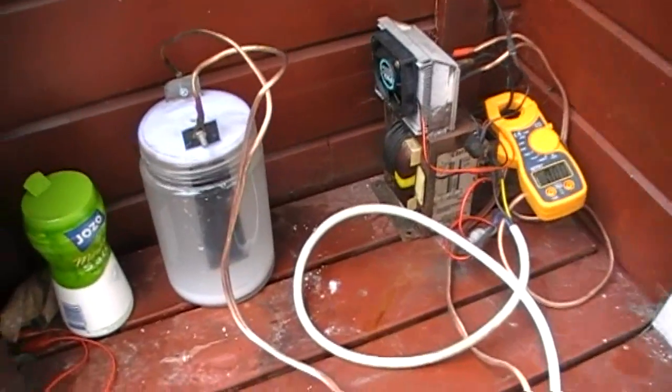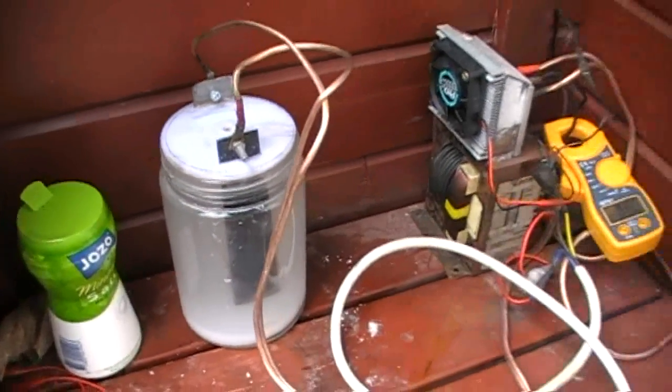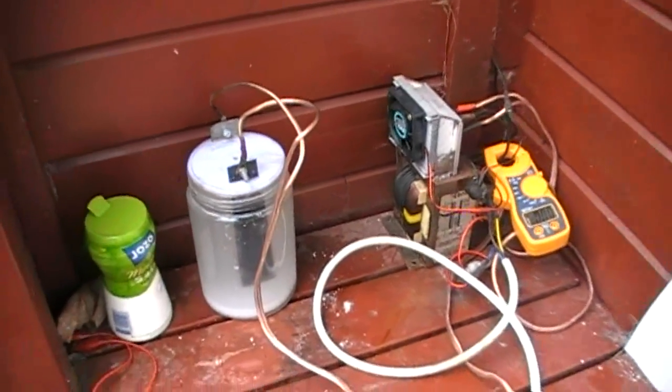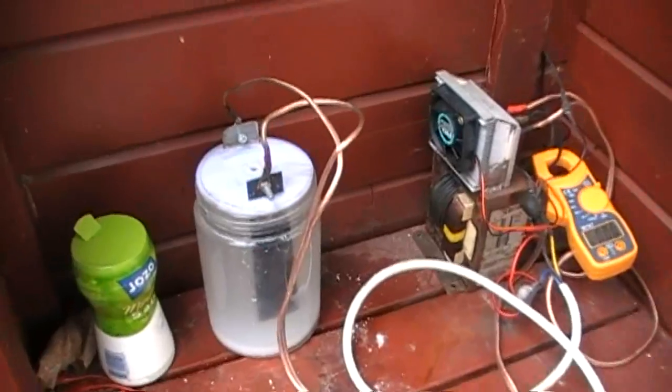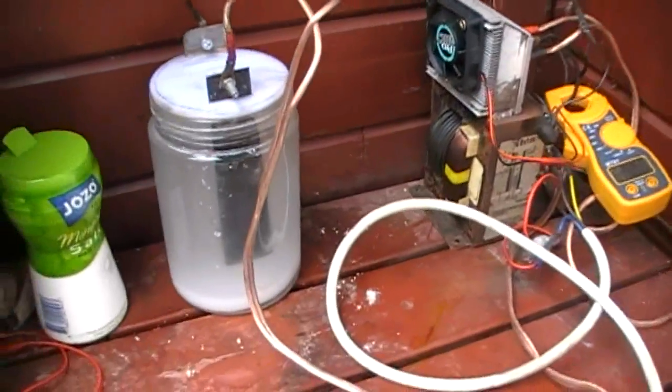Okay so here's my setup, there's my homemade supply and amp meter, here's my cell and it's just to plug it in and let it stand for some days and I will be watching the amps to calculate how long it should stay.